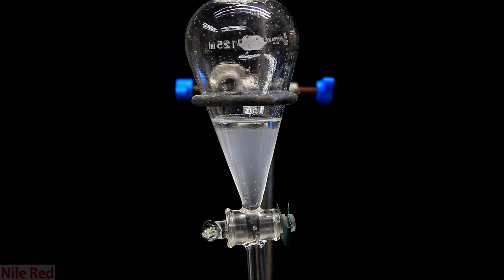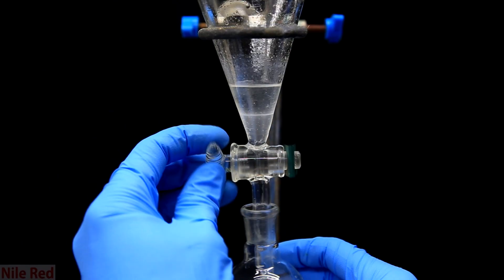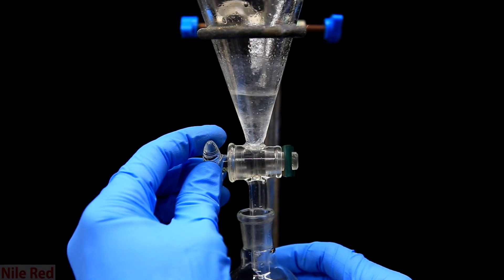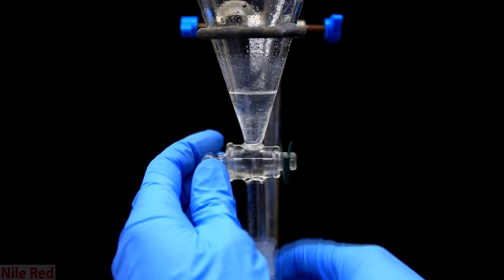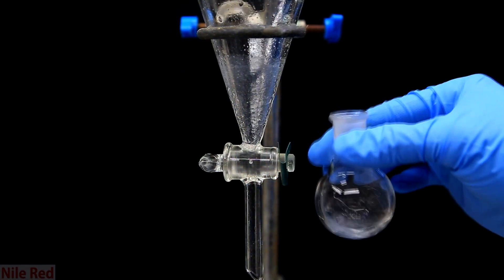The diethyl ether is immiscible with water so will also form a layer on top. Our bottom layer containing mostly salts and byproducts is transferred to a flask. The upper layer consisting of diethyl ether with our product dissolved in it is added to a different flask.